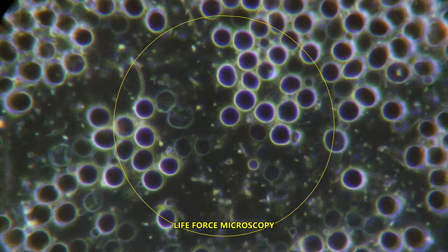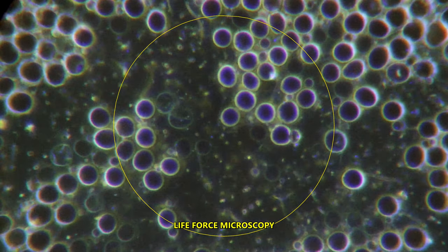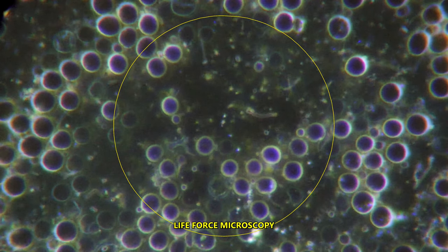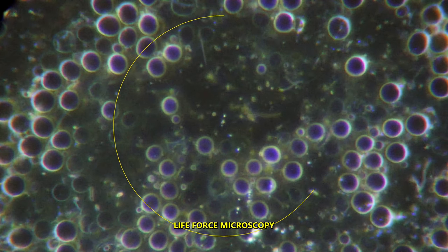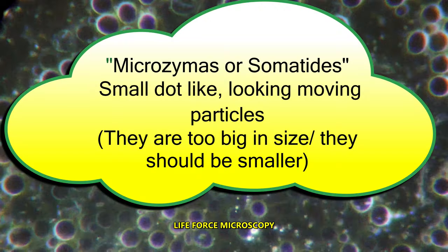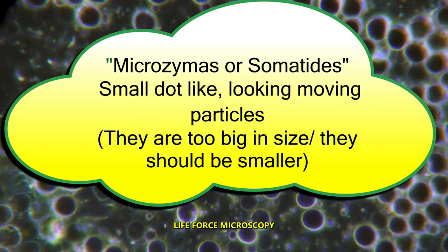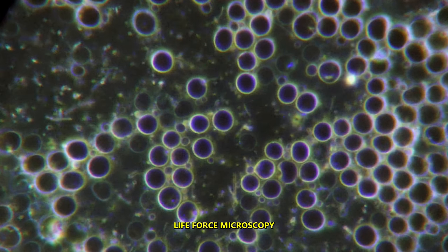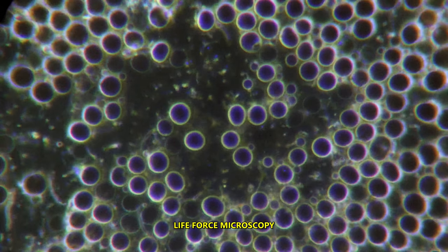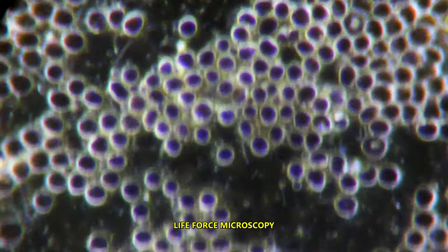Well, this has been just a very brief explanation of what we're seeing when we look at a fresh live blood sample, and again, everything that we have seen in this video is completely abnormal — this should not happen at all in a fresh, just-taken blood sample. I'll try to upload more videos in the future with more explanation so that everything becomes clear over time with each video I upload.